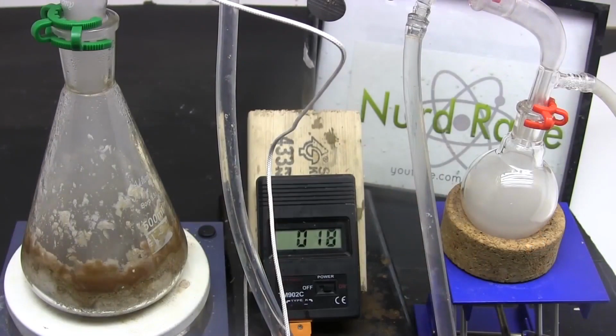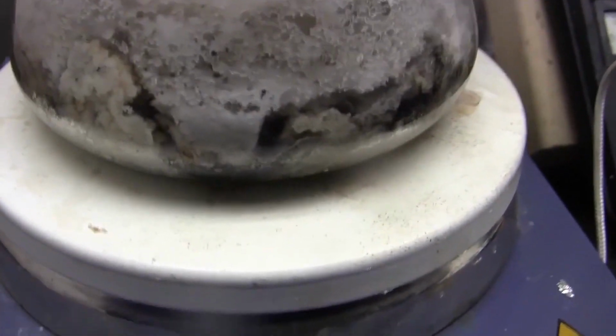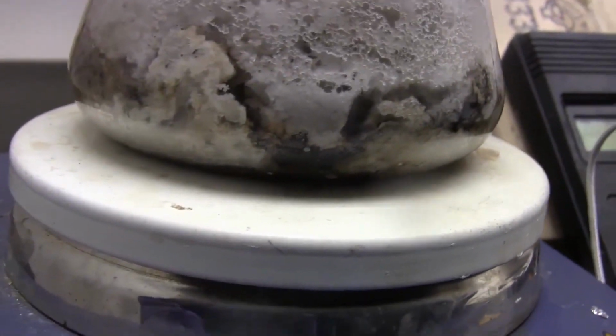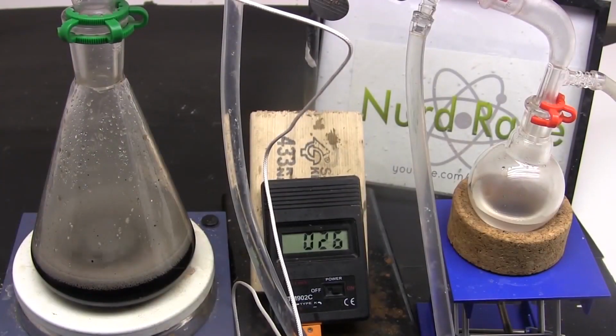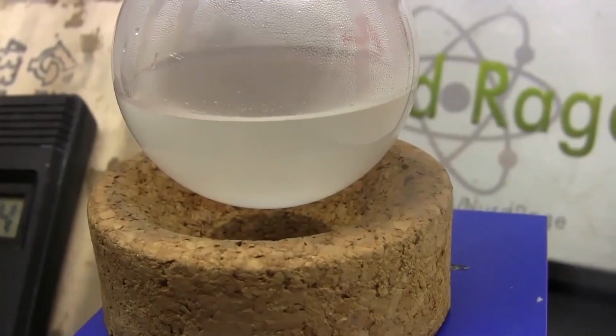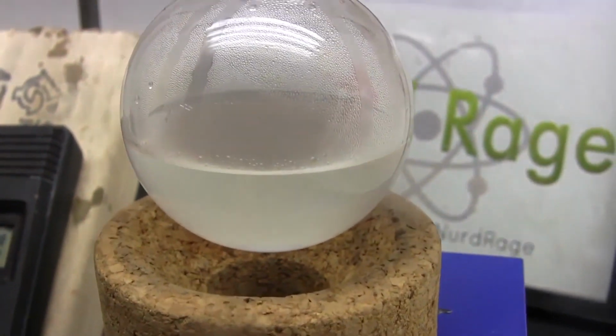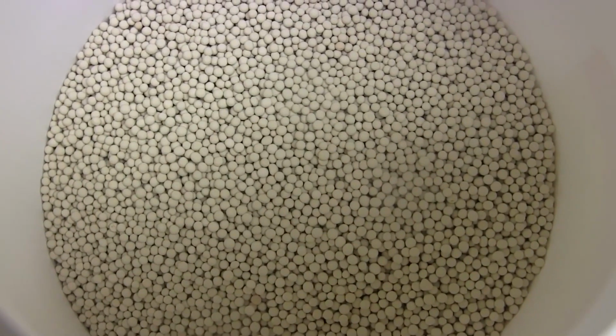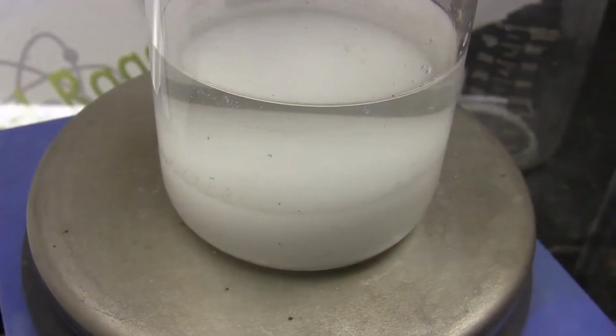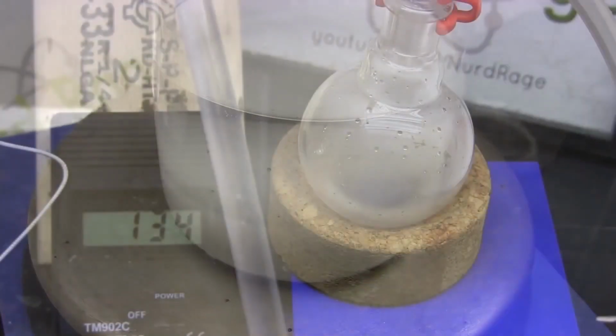Now to distill off the propionic acid. Oh, looks like I blundered here and didn't adequately mix the sodium propionate and sulfuric acid beforehand. To solve this, I just added a lot more sulfuric acid to ensure everything is dissolved. Once distillation is finished, we now have a crude sample of propionic acid. And now we cannot dry it using molecular sieves since those decompose in acids like this. So instead, we dry it with anhydrous sodium sulfate and then fractionally distill it.